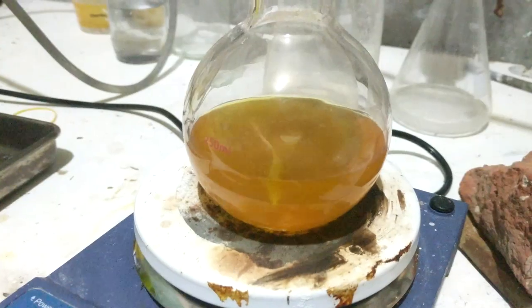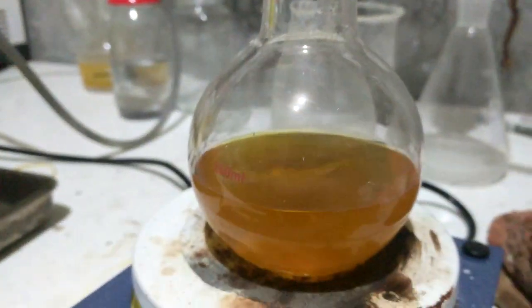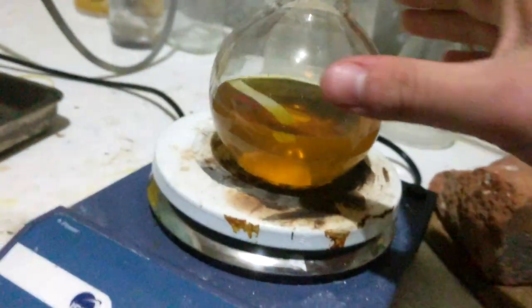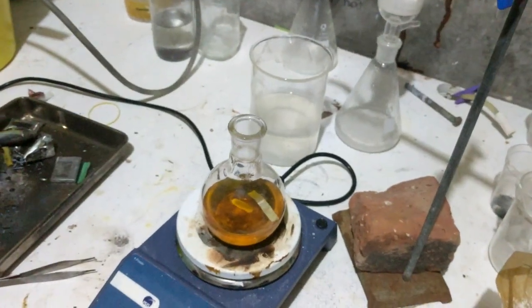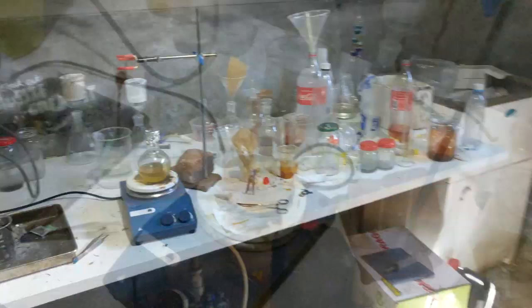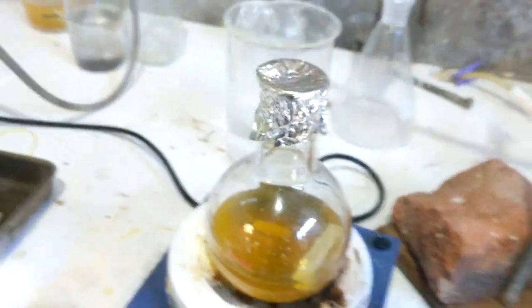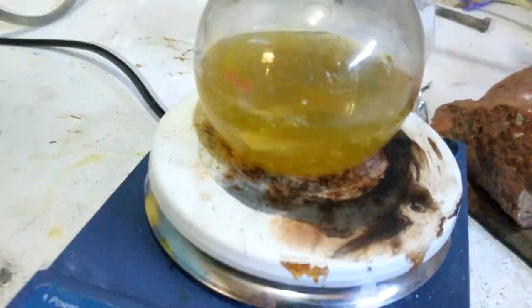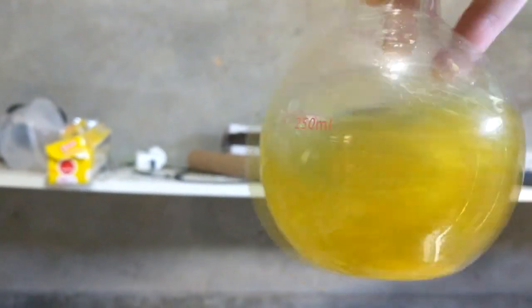We can see it bubbling and it's shifted color slightly. That last drop there on the far left — I think we're entering the right pH range, about pH 4, so that's what we want. We're going to let it cool down because it's still very very hot and we'll come back in the morning after some much needed sleep, and hopefully we have some tetrazole coming out of solution. Here we are the next day and it doesn't look like there's anything really in the flask except for that bit of pH paper. These solutions tend to form supersaturated solutions really easily — the hope is that we can just trigger it to crystallize out. There are definitely some crystals in there actually, so I'll chuck this in the fridge to cool down as much as possible.